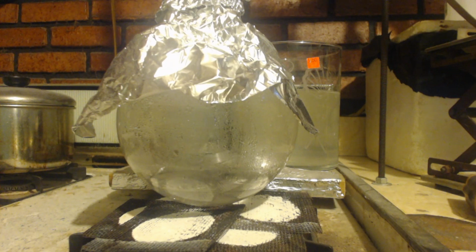Another idea would be to take the sodium ethyl sulfate that has this ethanol on it, dissolve it in water and then recrystallize it from water. That way you'll most likely remove the alcohol crystalline part of it, but you'll add water onto it and then use that to make the nitroethane.